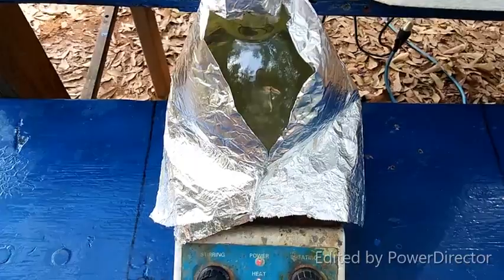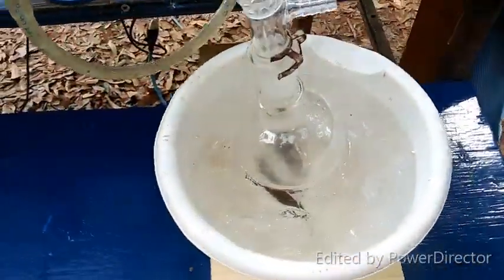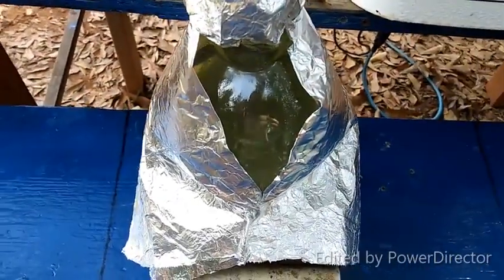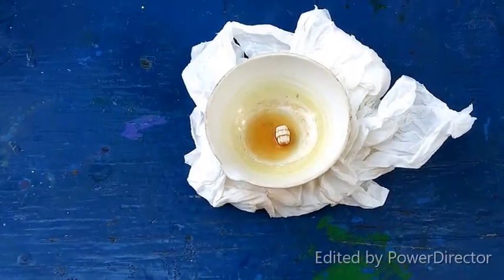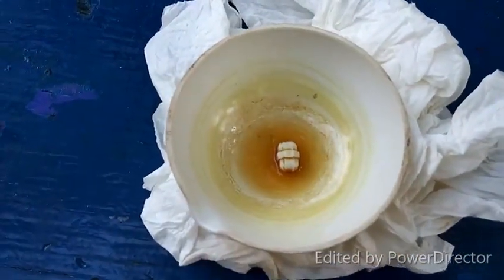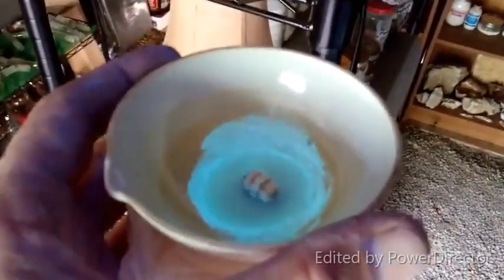The distillation is going nicely, getting a little cloudy as it goes. Surprisingly, you can't really smell any ethyl acetate, probably because it's chilled so well. Here is what we've got left after the ethyl acetate was all evaporated away — just a little bit of ethyl acetate in the bottom. But as you can see, we have harmala alkaloids crystallized out on the bottom. And we can tell they're harmala alkaloids because they fluoresce like crazy — look at that. How cool does that look? It's like something off a movie.